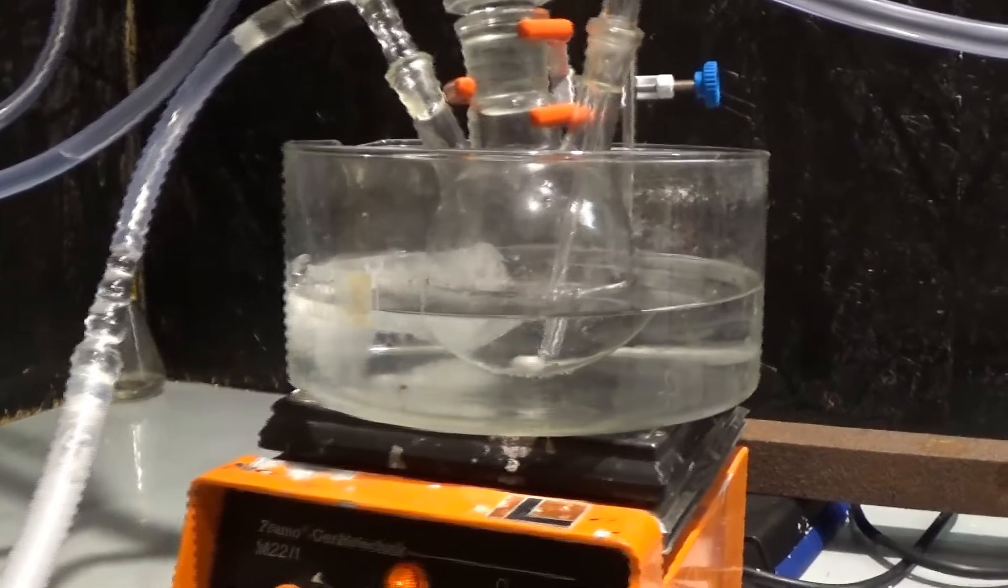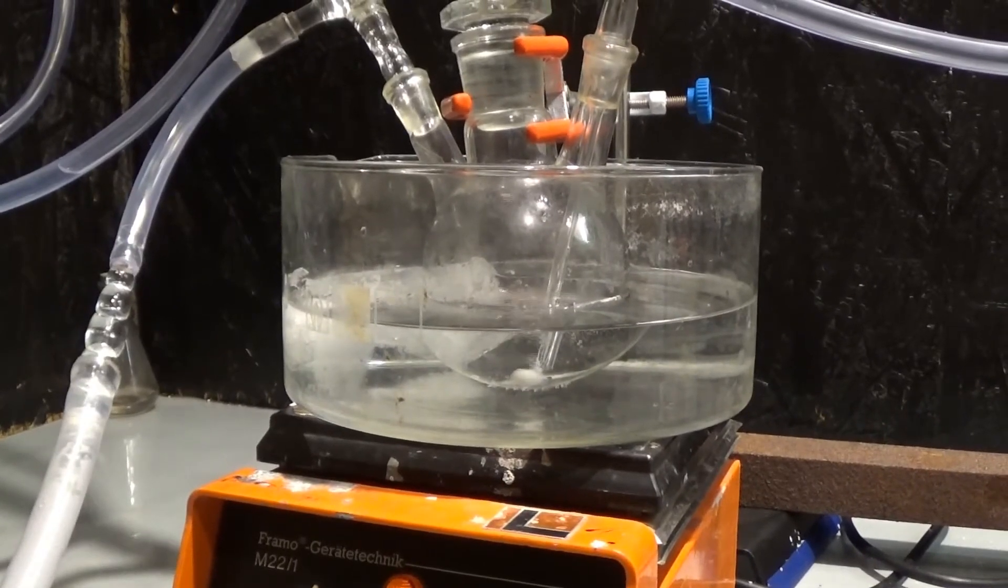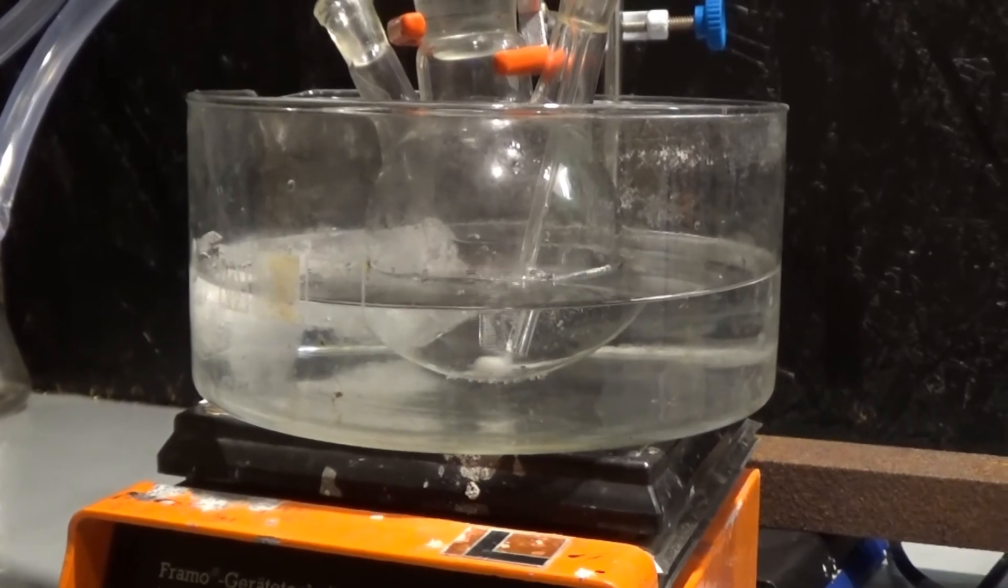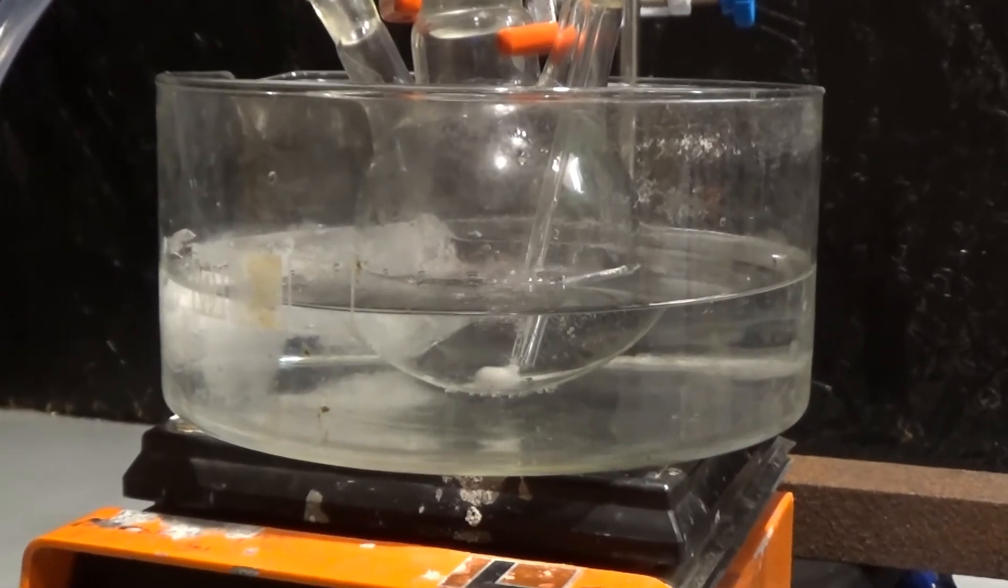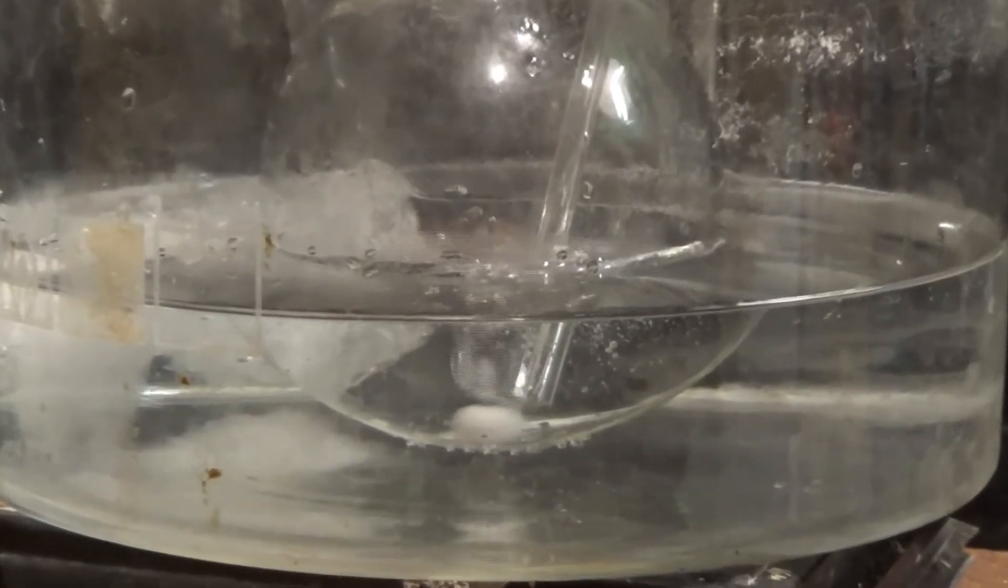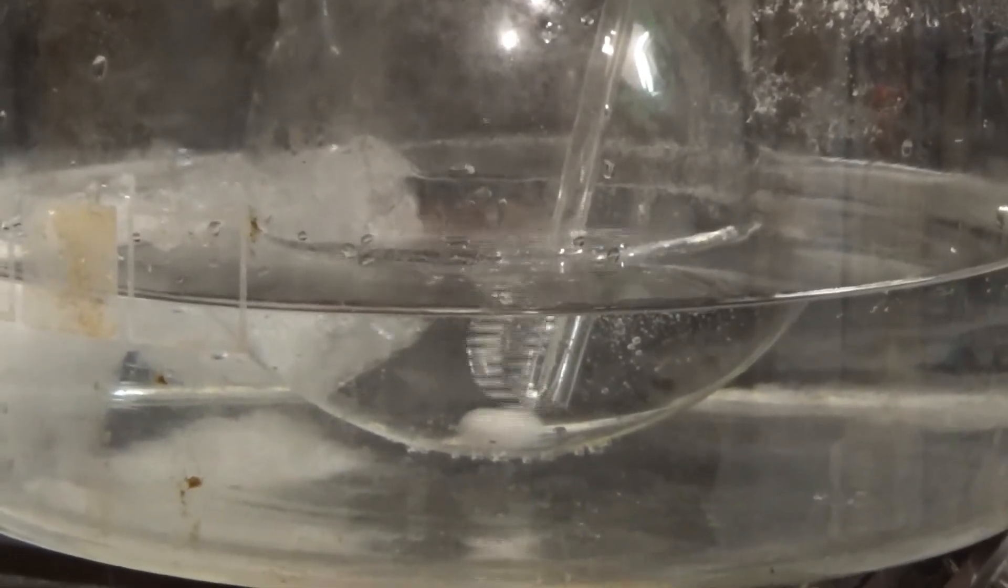The start of the reaction is performed in an ice bath which temperature should be raised over time until boiling occurs. For my attempt I just used the ice bath without raising the temperature which gave me a horrible yield as a reward.